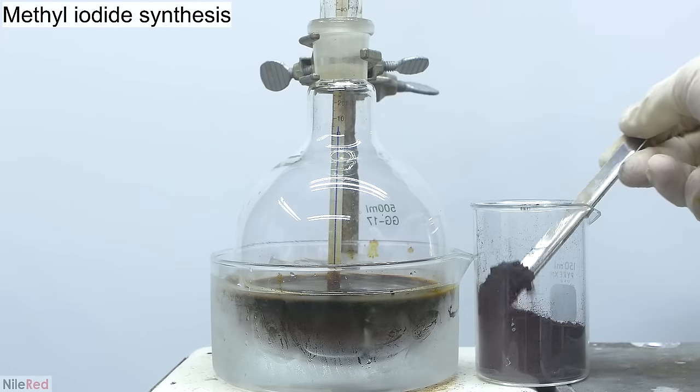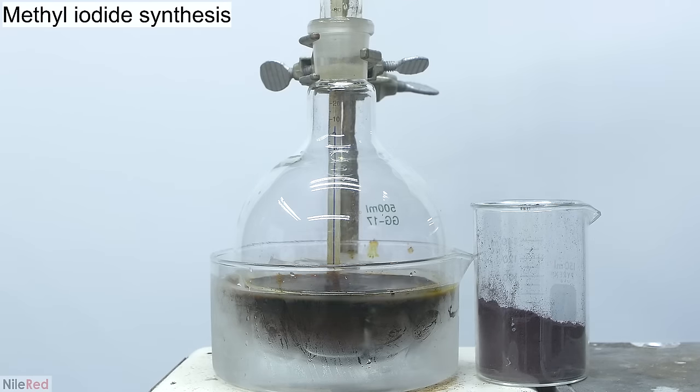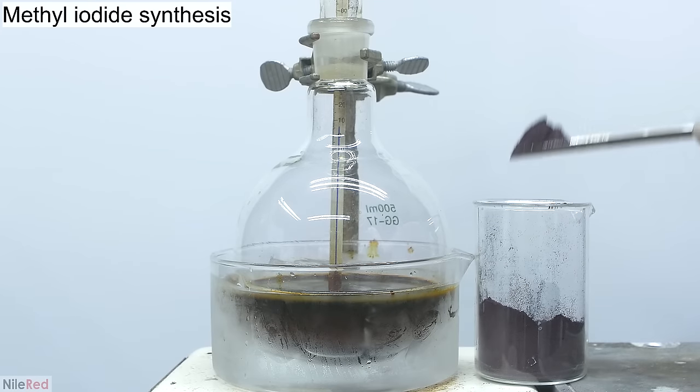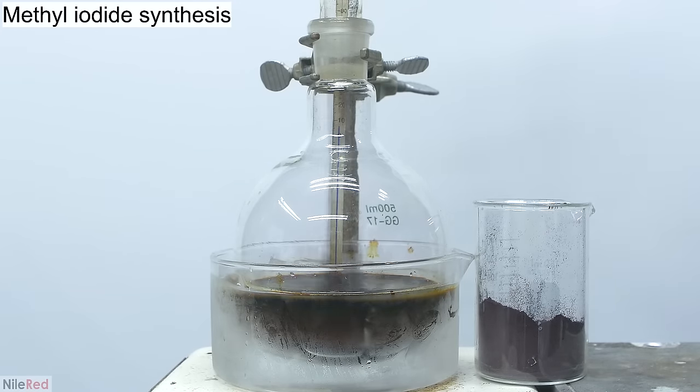Just as an example, I used 50 grams of red phosphorus in my methyl iodide video and to get it from striker pads, I would have had to strip something like 1600 boxes.